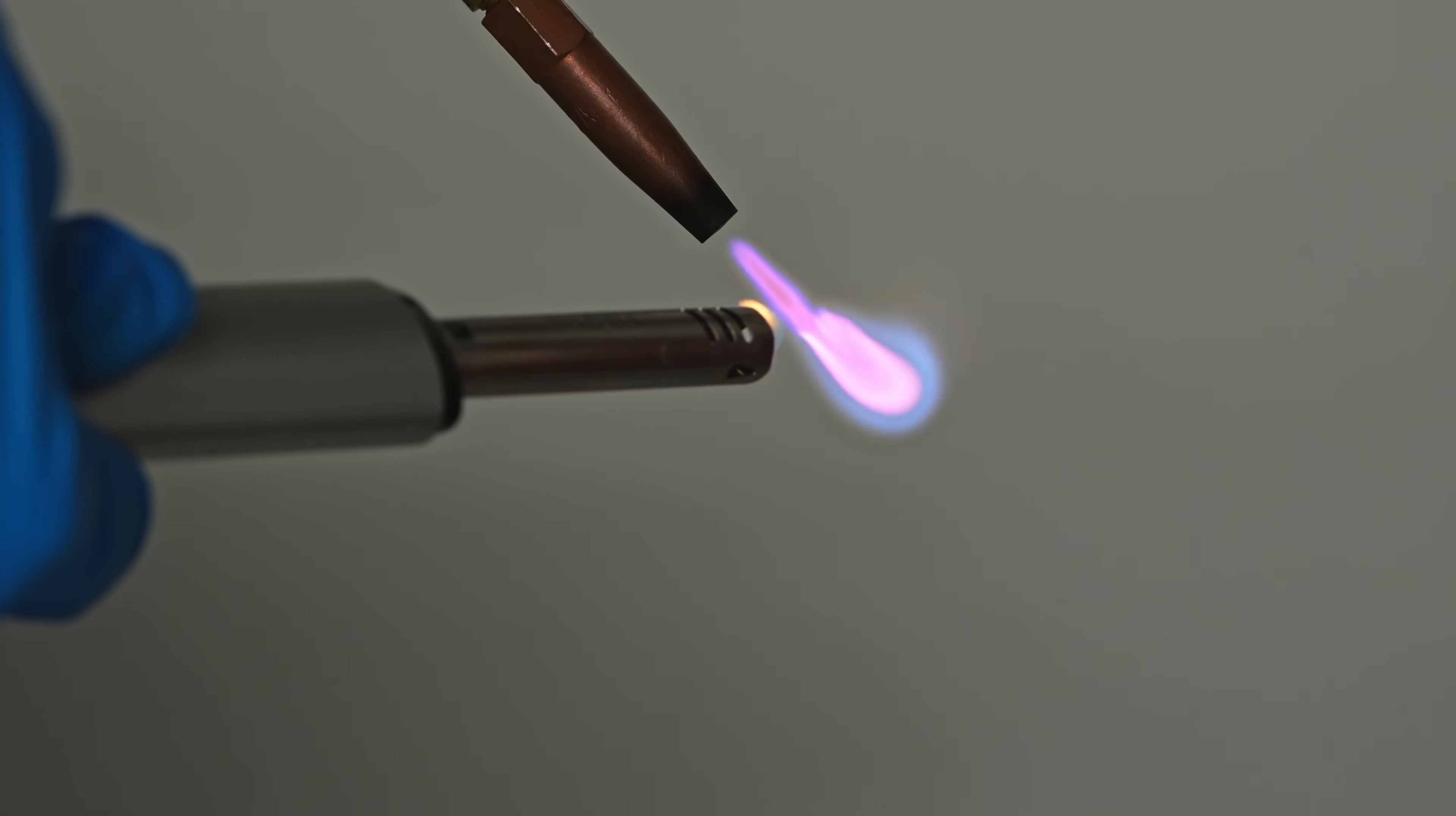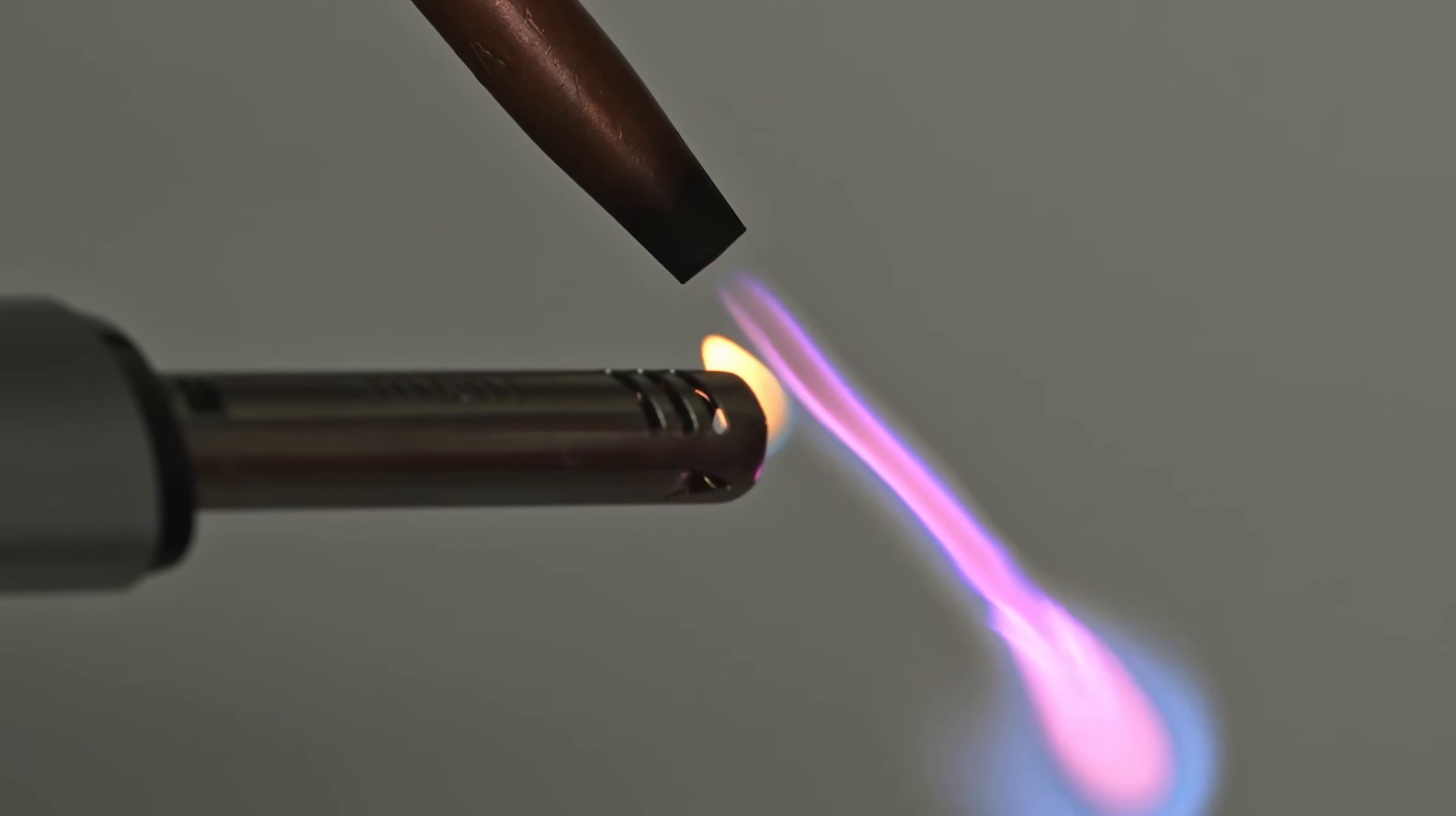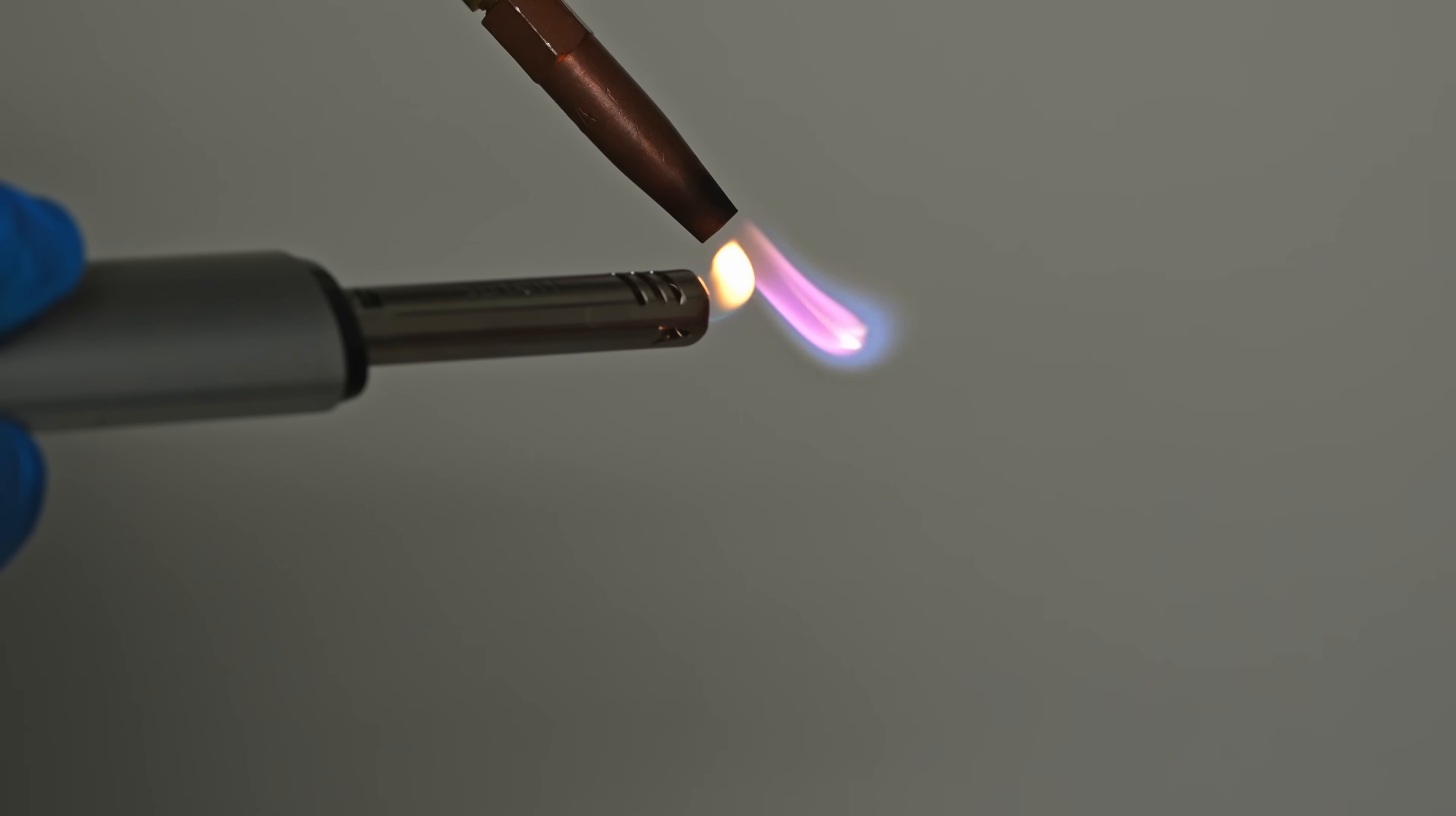Wow, now the flame of cyanogen is really impressive. However, I have not yet been able to achieve stable and sustained combustion. It remains intermittent.